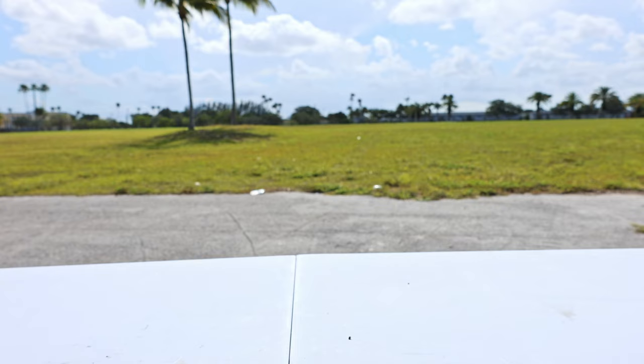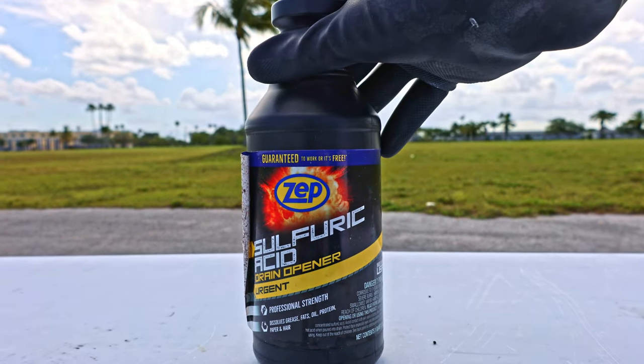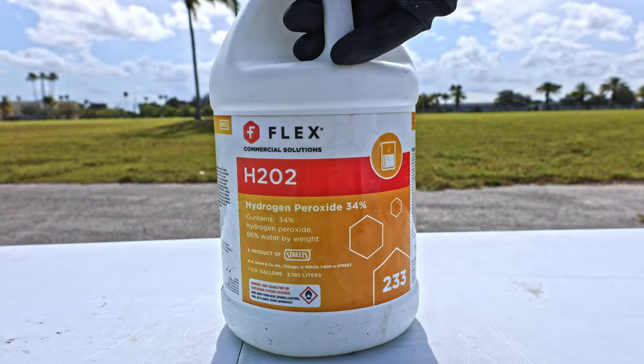Today I'm going to show you how to make white fuming nitric acid. The materials you need are sodium nitrate, sulfuric acid, and 34% hydrogen peroxide.